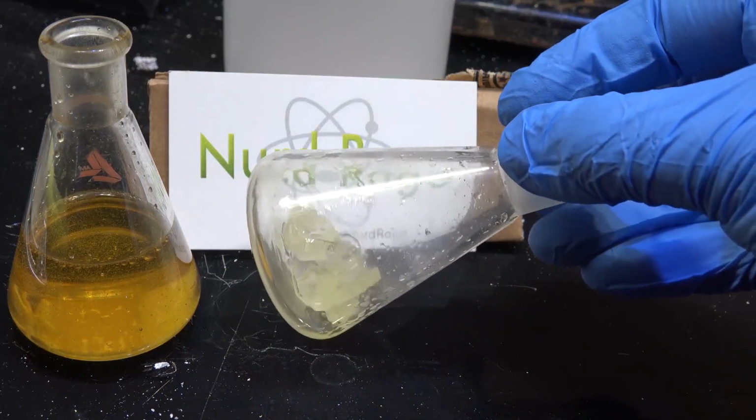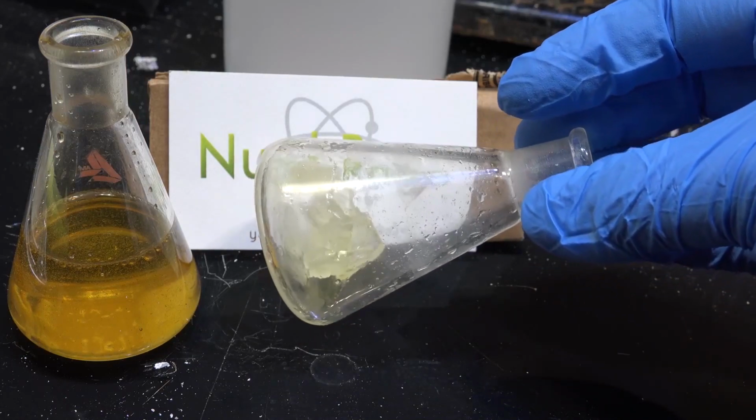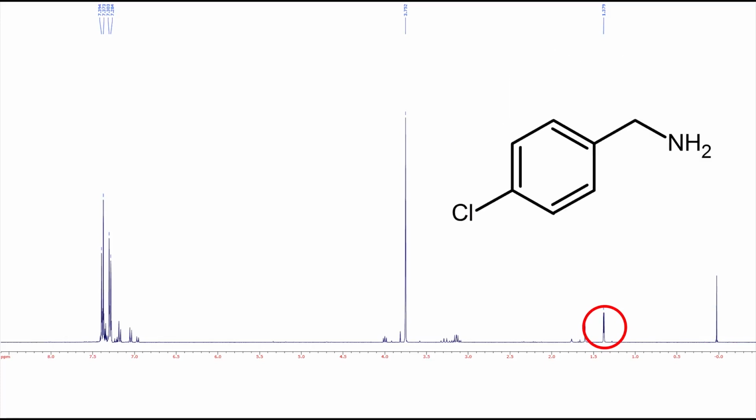Our crystallized yield was only 12% though, so let's see if the uncrystallized supernatant is still good to use. And this is the NMR spectrum of the supernatant liquid. It's actually pretty good for an amateur level synthesis. A significant impurity is this stuff. This is p-chlorobenzyl.